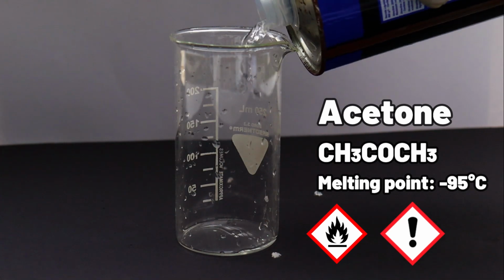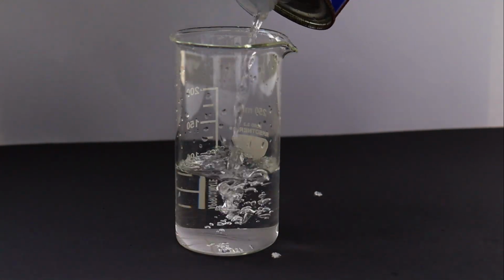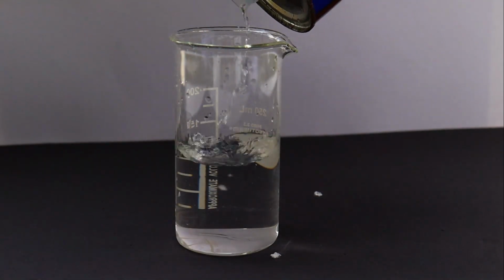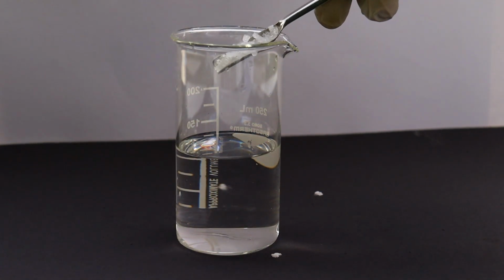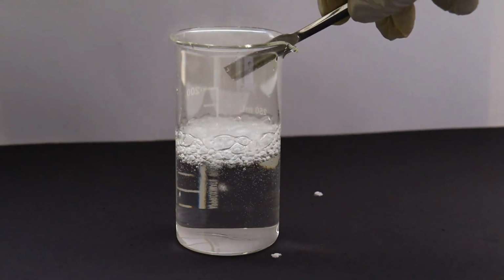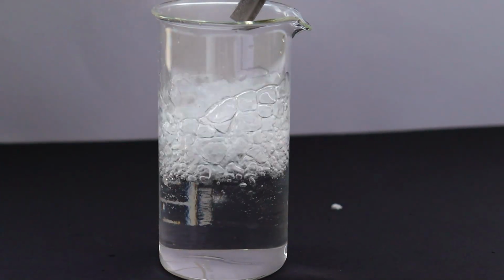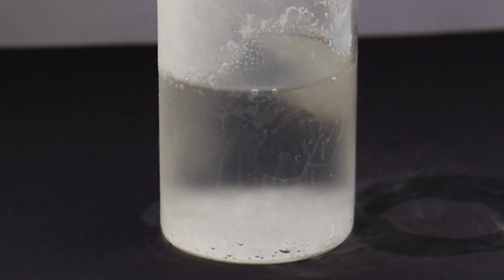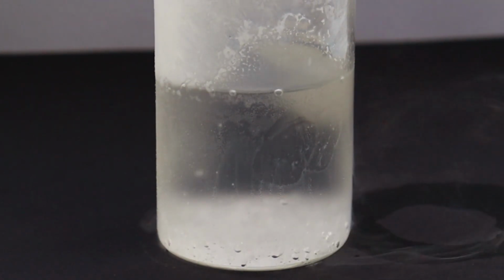But if instead of water we use a liquid that has a freezing point lower than -80 degrees, for example acetone, ethanol, and other solvents, we can create very cold cooling liquids. We can slowly start to add some dry ice to the acetone, but we must do it very slowly to avoid overflow and splashing. With that temperature, we can liquefy some gases.